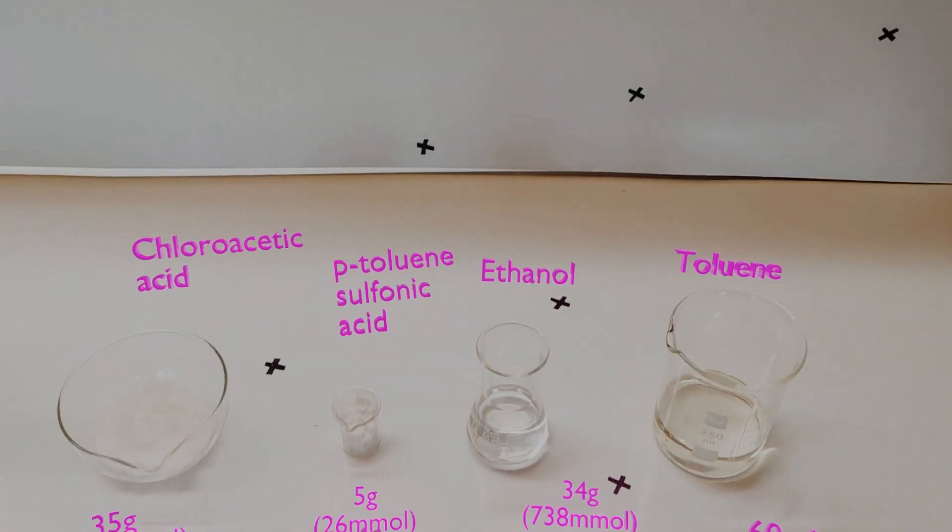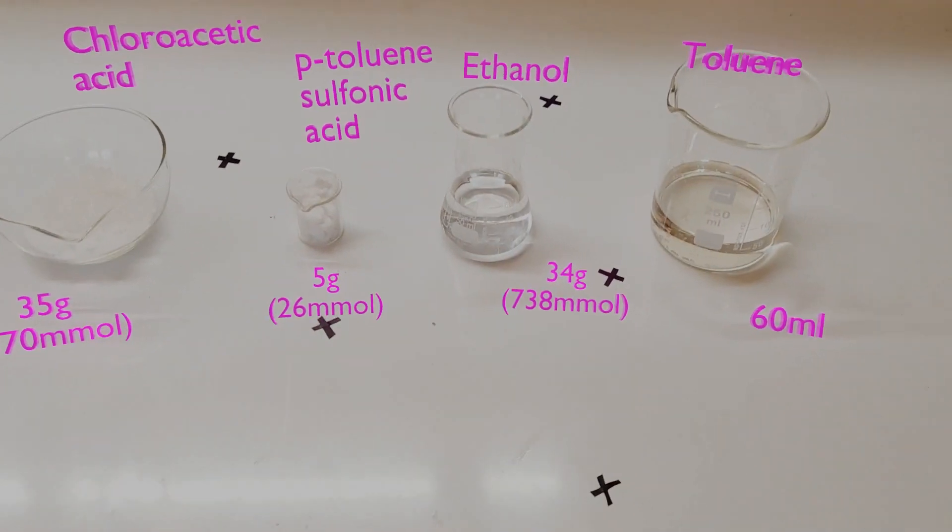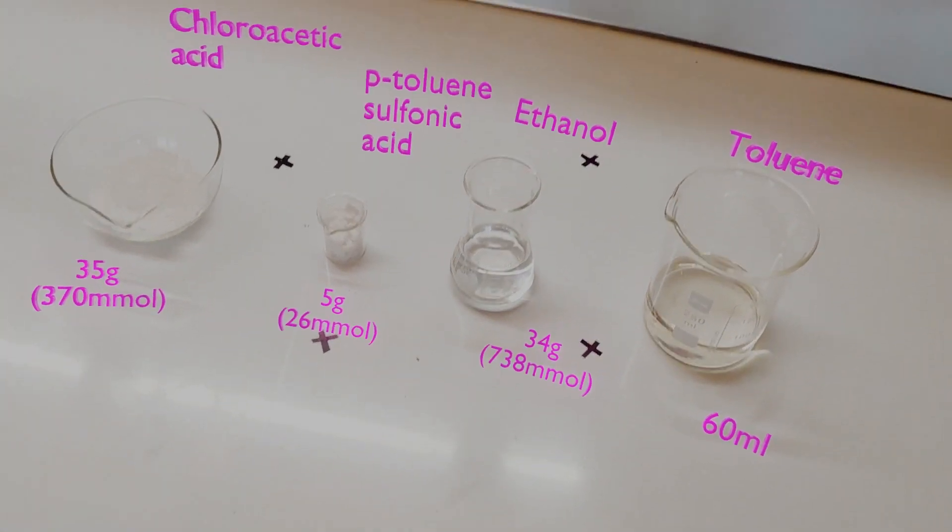For this reaction, we will be reacting chloroacetic acid and ethanol with para-toluene sulfonic acid as the catalyst and toluene as the solvent. We begin by adding all the reagents into the reaction flask.